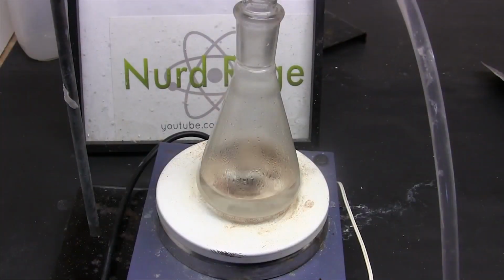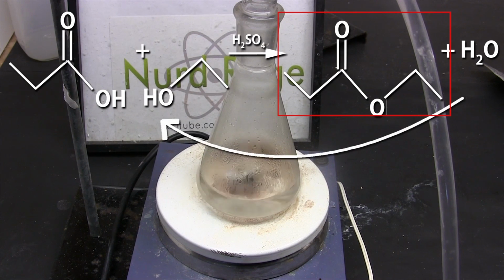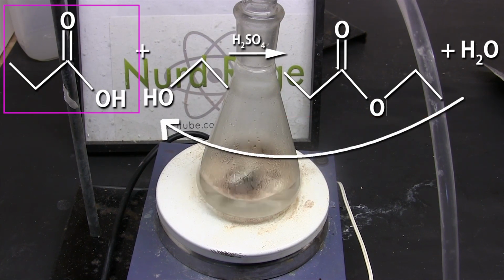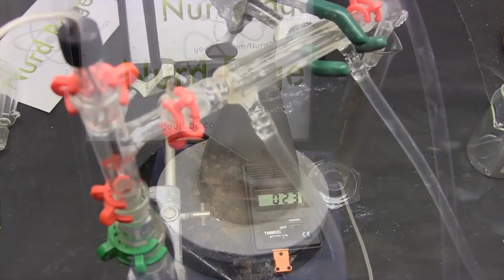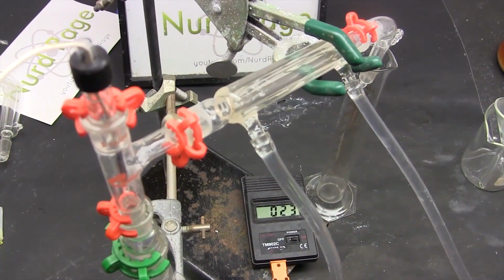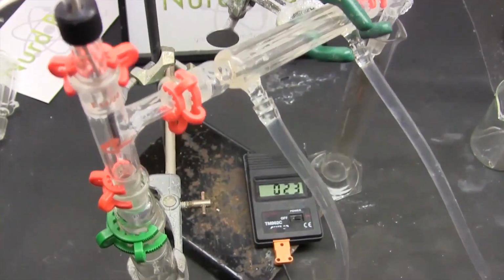The reason why the yield was so low was because the reaction is reversible. The water can react with the ethyl propionate and produce propionic acid and ethanol again. If we could remove the water, we could drive the reaction forward. Unfortunately, we can't just distill the water out because the ethanol and ethyl propionate azeotropes have even lower boiling points.